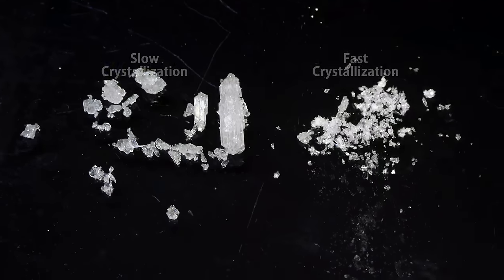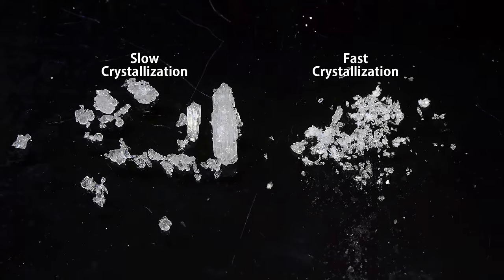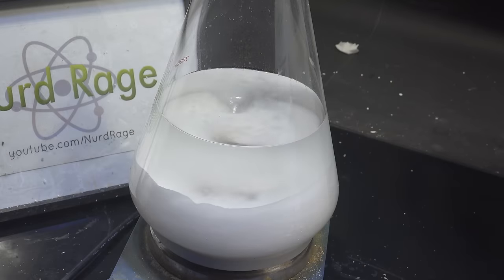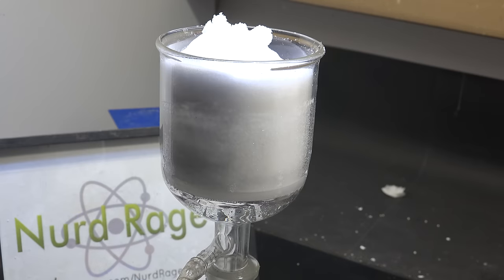When things slowly crystallize, like in a chlorate cell, they tend to form large crystals. But when they're forced to recrystallize very quickly they tend to form very small crystals. This gives us the basis for controlling crystal size. For pyrotechnics and similar, smaller crystals are preferred for faster more consistent reactions. Okay it's cool, let me filter it.